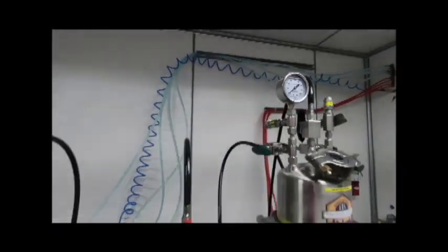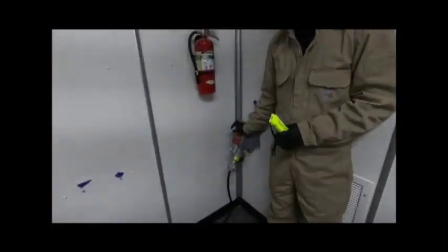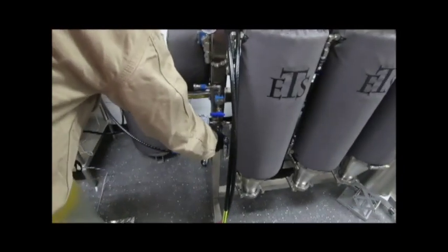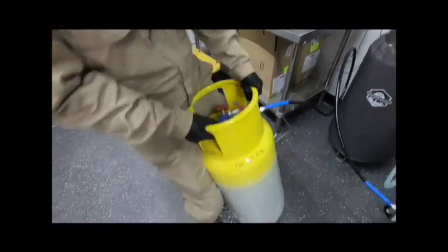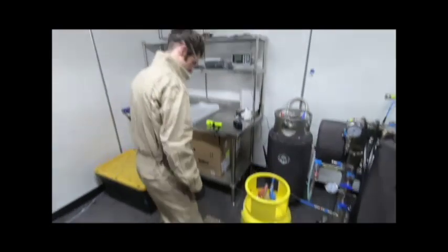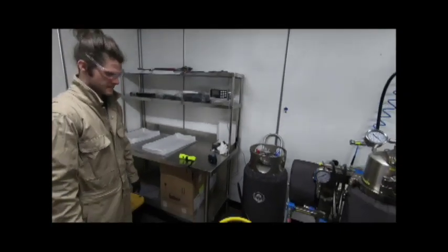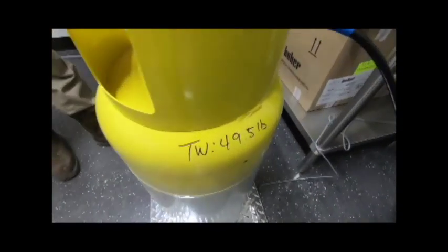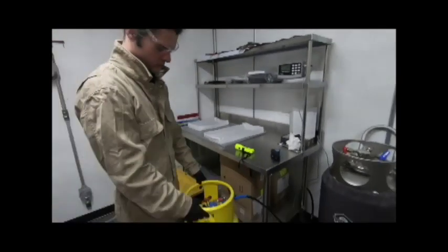Once gas is sufficiently recovered and you're ready to remove slurry from collection column, shut off Corgan pump using C1 D1 switch on the wall. Close blue discharge valve on extraction platform. Close blue valve on top of operating tank. Remove operating tank from scale. Zero out scale. Re-weigh operating tank, taking note of the remaining gas left in the tank by subtracting tare weight from display weight on scale. Place operating tank in a designated location.